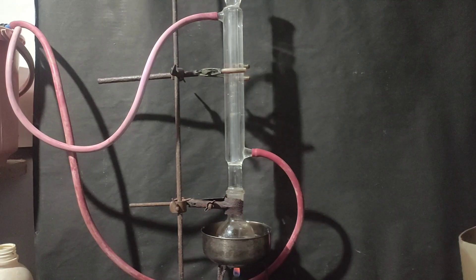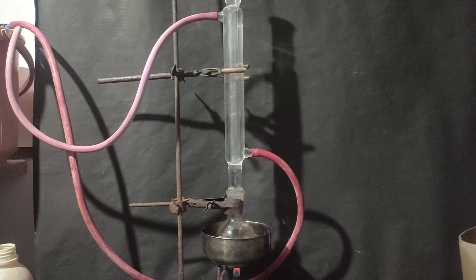After all the nitrating mixture was added, I placed the round bottom flask on a water bath with a condenser on the top for a reflux. The contents were refluxed on a hot water bath till 40 minutes.